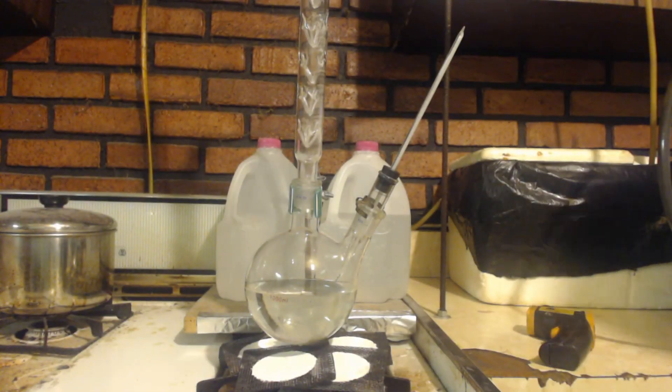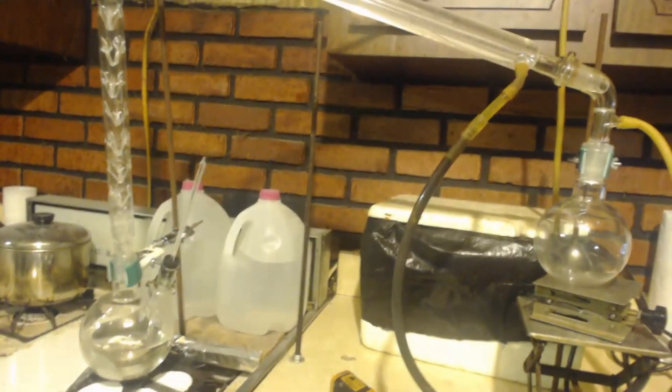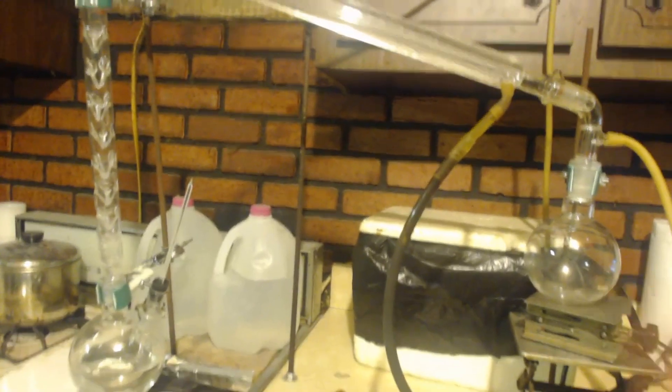I just want to see what the yield is. You can see I put all the filtrate in a thousand milliliter round bottom flask. I got a vigreux column. And I'm just going to distill that up.